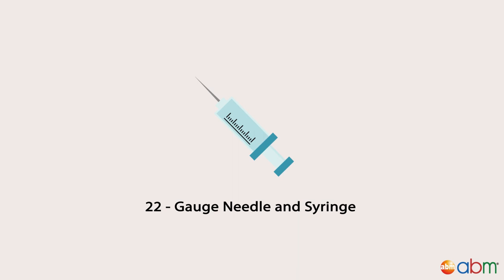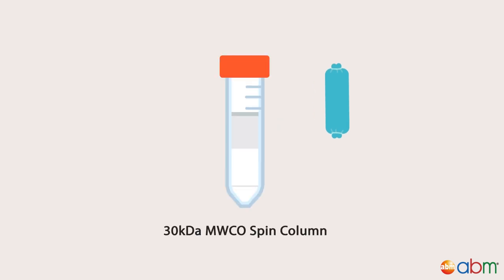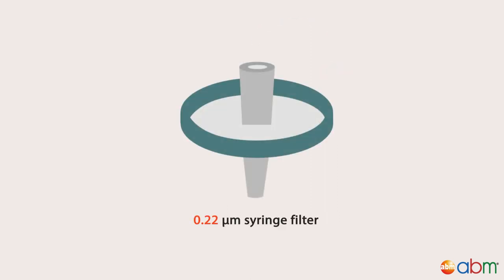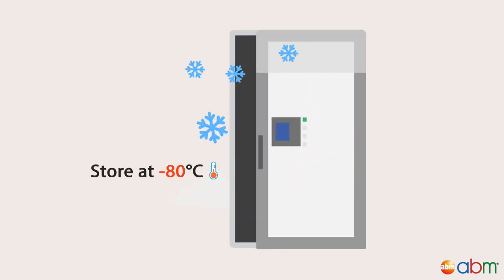To extract the virus band, use a 22-gauge needle and syringe. Pierce a hole at the top of the tube to release air pressure, then insert the needle 1 cm below the lower virus band. Carefully extract the intact virus with the bevel up. Transfer the virus particles to a 30 kDa MWCO spin column and concentrate to the desired volume. Filter the virus solution with a 0.22 µm syringe filter, add glycerol to a final concentration of 5%, mix thoroughly, aliquot, and store at minus 80 degrees Celsius.